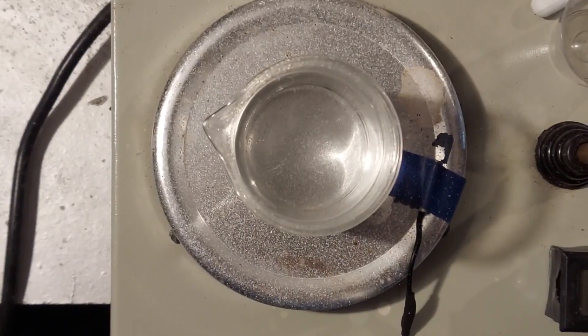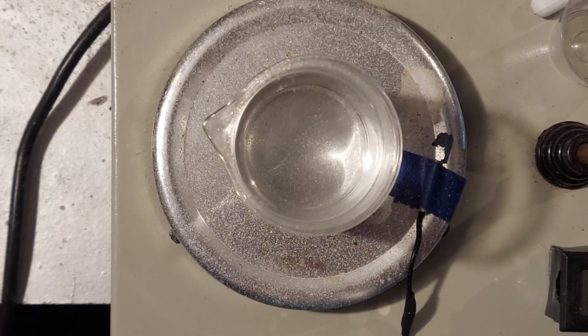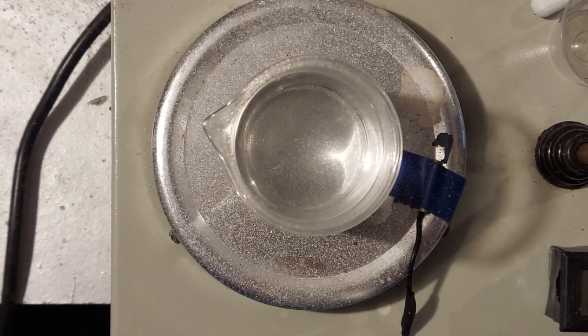One last comment here. This will bubble easily, and it does give off what smells pretty bad as far as a fume goes. So just be careful with that. But if you drop something into there, you'll notice a ton of bubbles are formed. I'm not 100% sure what that is, but just be aware of it.